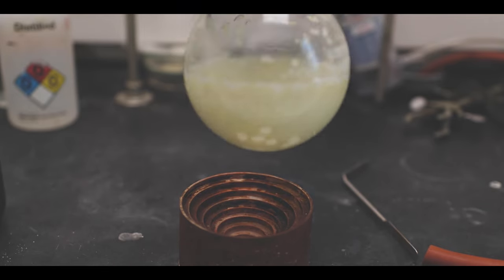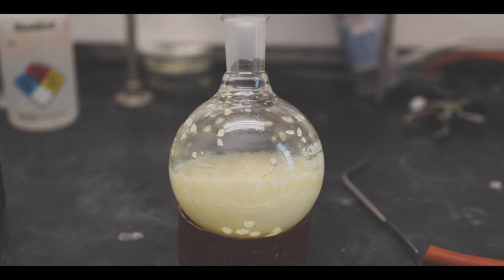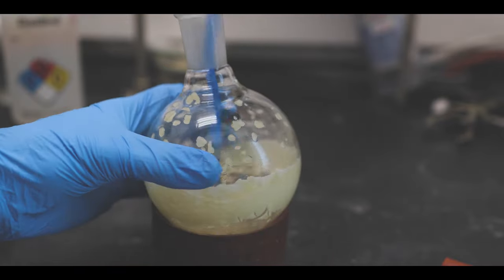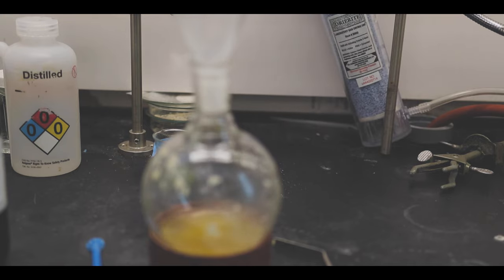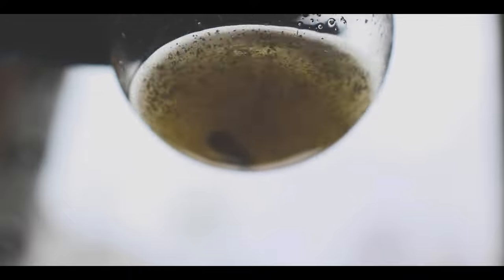The crude mixture was then scraped using an oblong plastic apparatus, but it was to no avail. A minimal amount of hot water was then added to the round-bottom flask, stirred, and then placed in a refrigerator overnight in order to facilitate recrystallization and reveal the pure melatonin product.